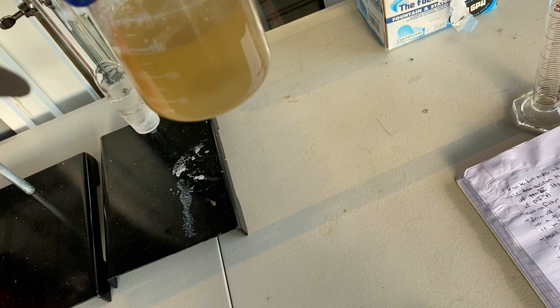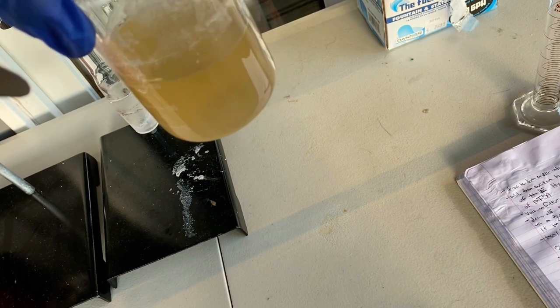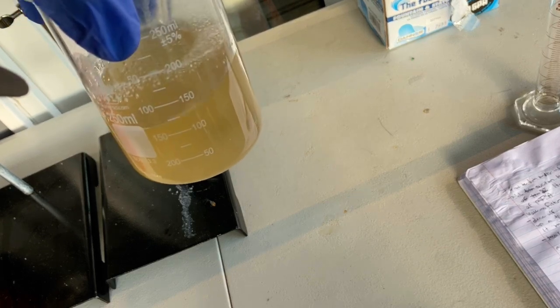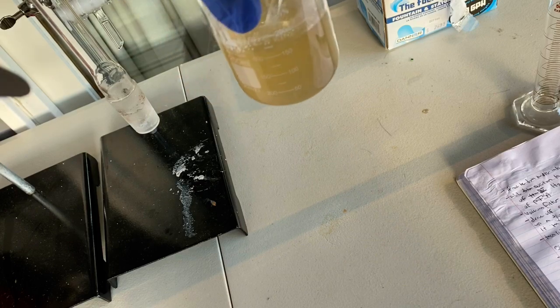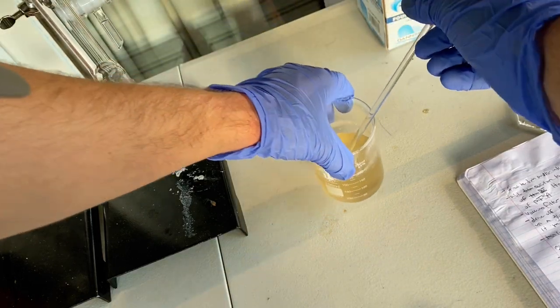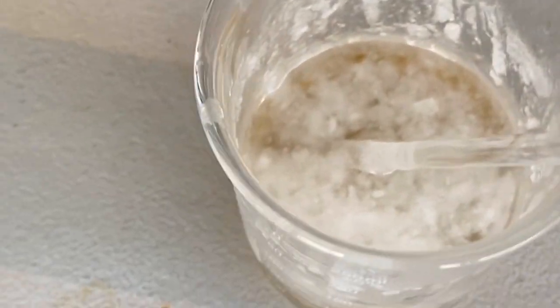And we're gonna let it cool now. And, yeah, there's some crystals forming on the sides, as you can see. So we'll let this cool, and I'll come back once it's cooled off. All right, see ya. So this is it after a minute or two.